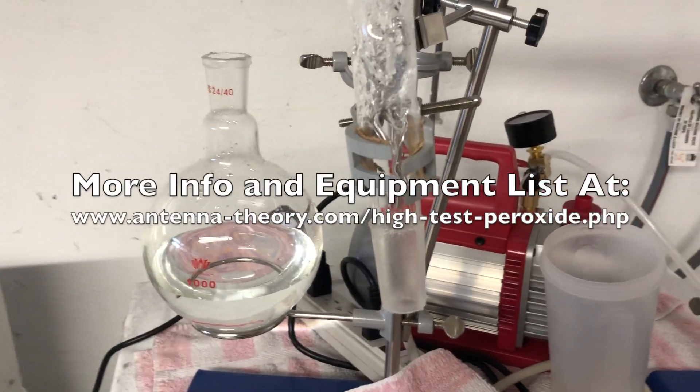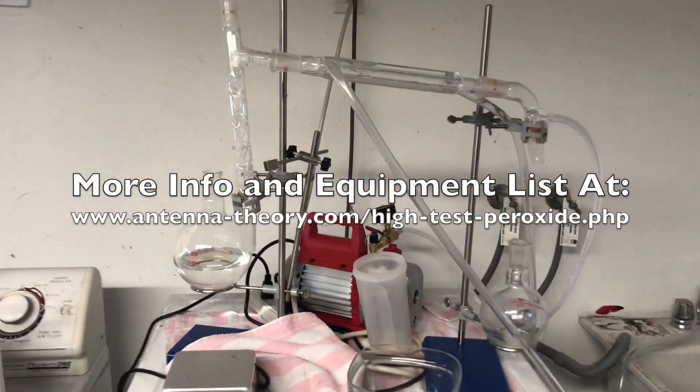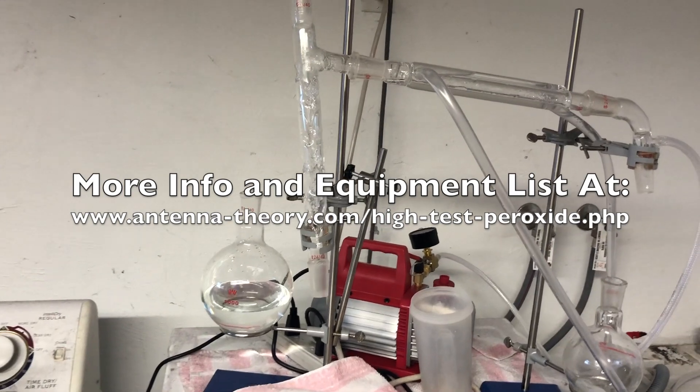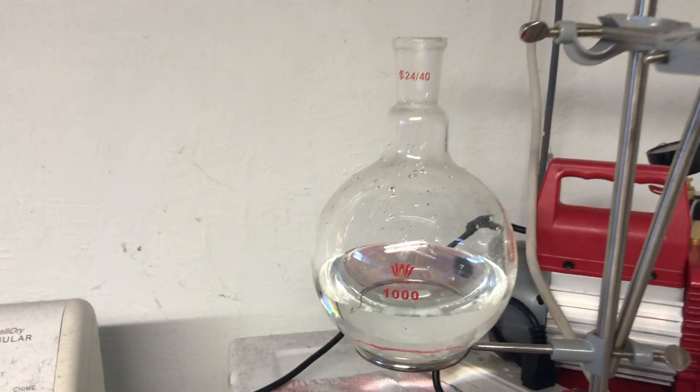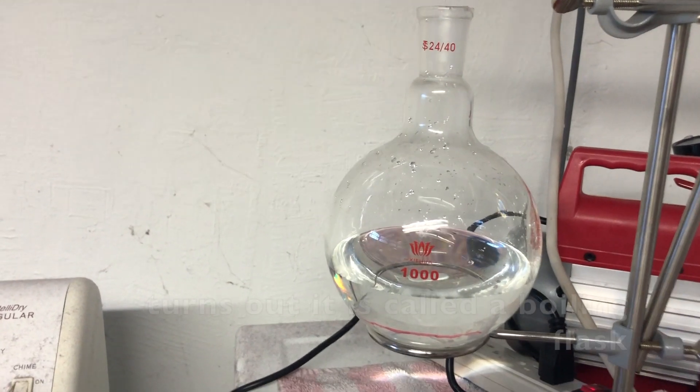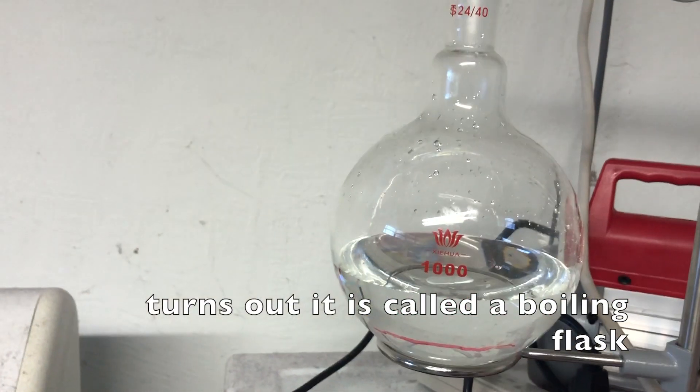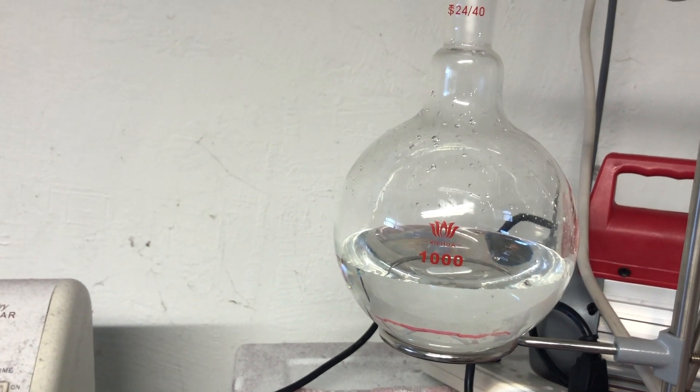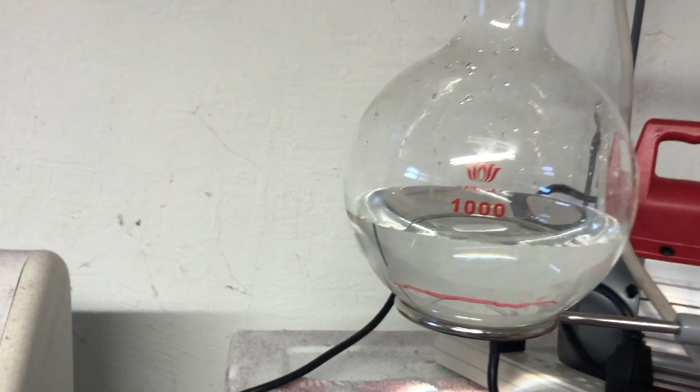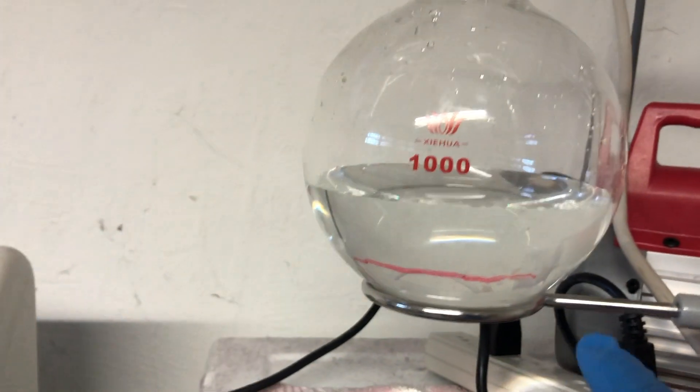To take it the rest of the way we're gonna do what's called a fractional distillation. Start with using a one liter flask. So I put 400 milliliters in there.